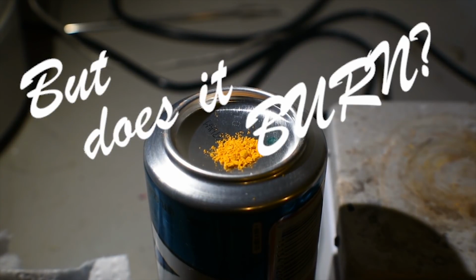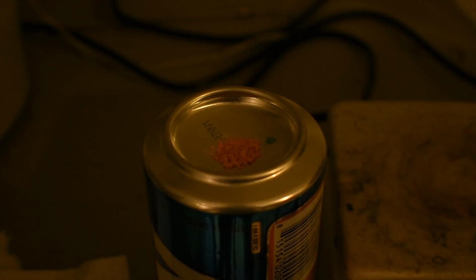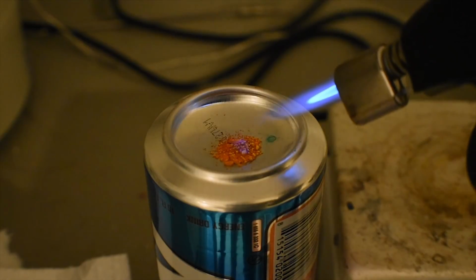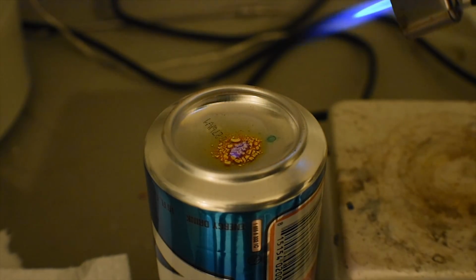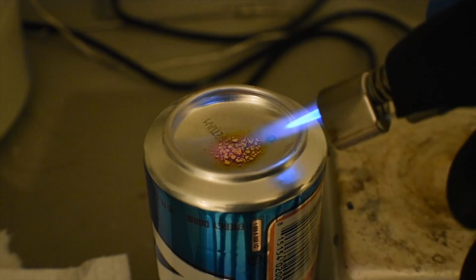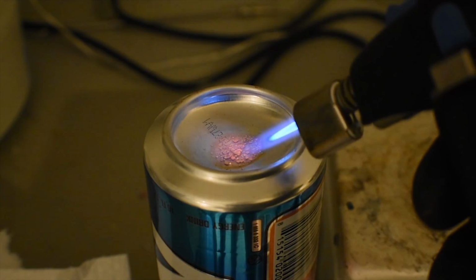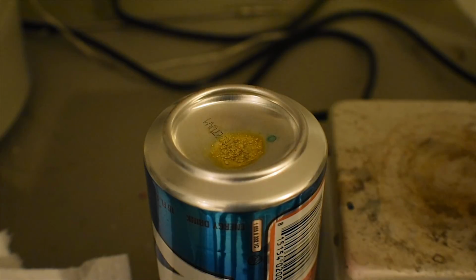But does it burn? They ask. Well, let's find out. There's something there. Ugh, smells like sulfur dioxide. I mean, not really, but nothing terrible.